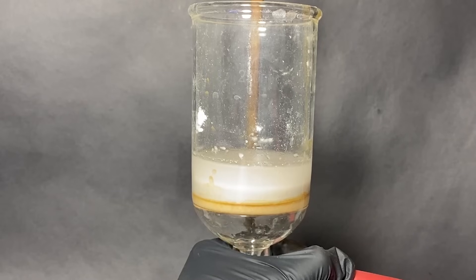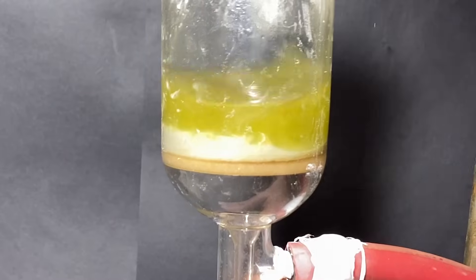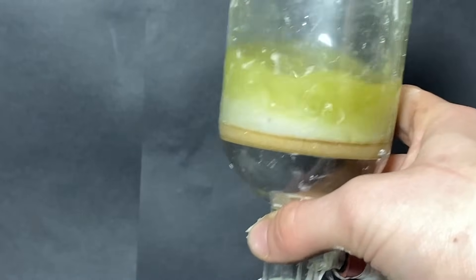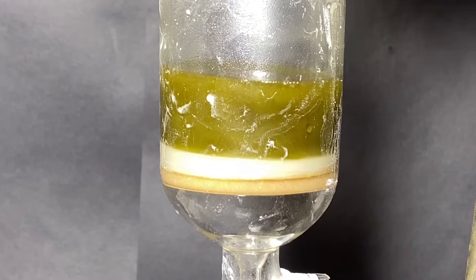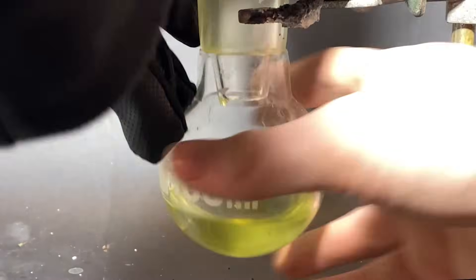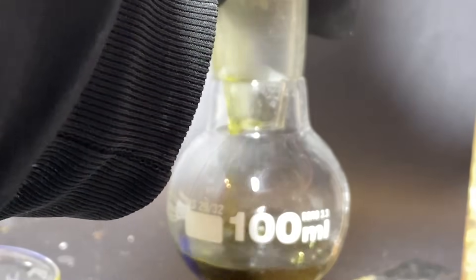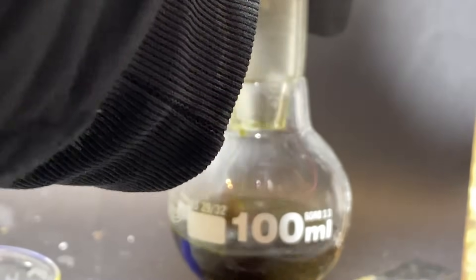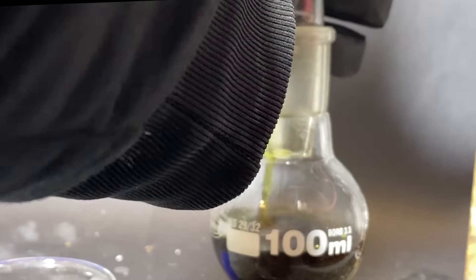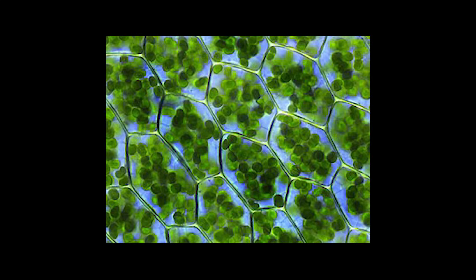I was concerned I might get wasted off the alcohol vapors alone, but in the end it worked out fine. Once I started adding the ZA-ZA extract, the seal got displaced, which was pretty bad, but using some quick thinking I was able to fix it. Then I added the rest and started pulling a vacuum. You can see the solvent getting leached through the column. The first fraction was collected until a green color started appearing, then I pulled the vacuum once again, and this is our second and final fraction — much greener, but I bet there will be much more CBD here. It seems the green dye moves very fast through the silica, and as it turns out it will be the main contaminant. I'm not sure what exactly this dye is, but I'm pretty sure it's chlorophyll.